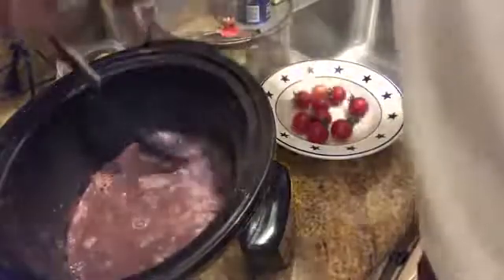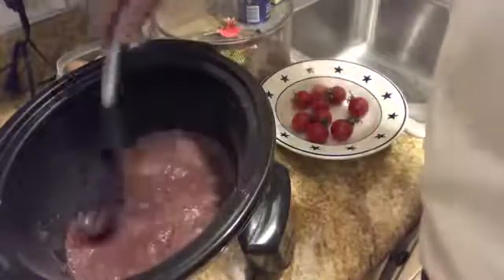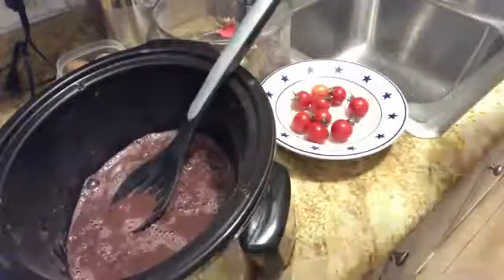You can see the powder dust coming up — you don't really want to inhale this dust, it's not particularly good for you, just like any other dust. Stir it around a little bit, just like you were making tomato sauce or something. Just want to get all the bark nice and wet. Now I'm going to go grab my vinegar.